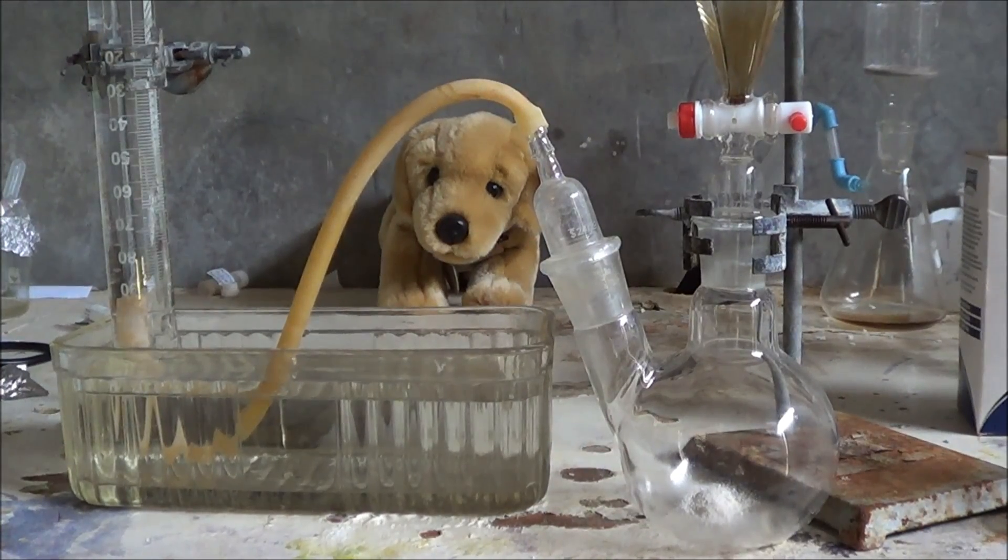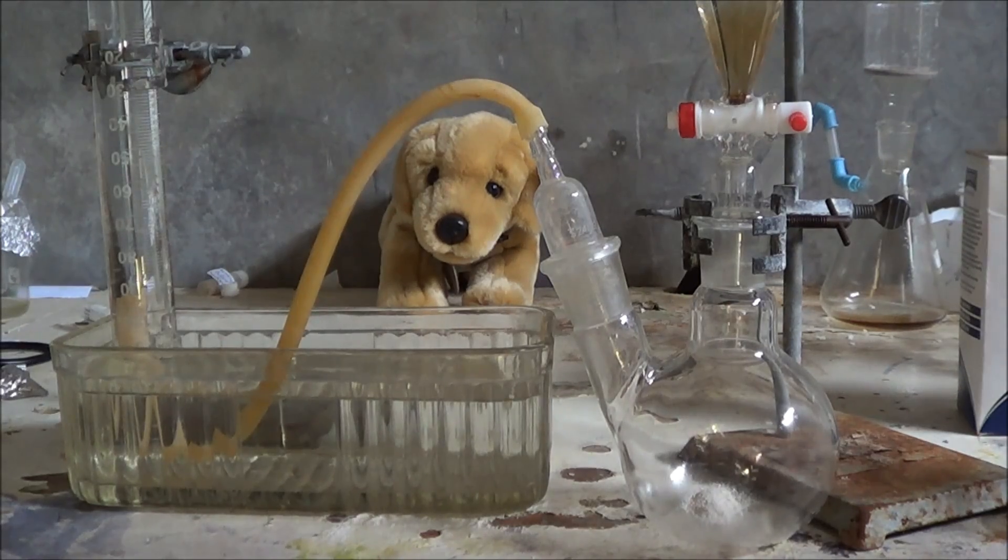Okay, this is the paint tin sample, with 25 mils of water and 2 mils of acid.